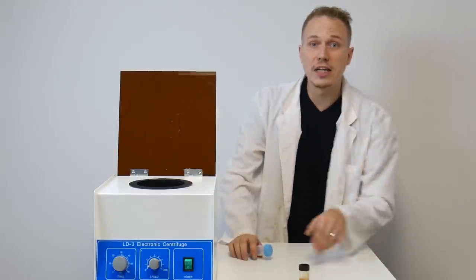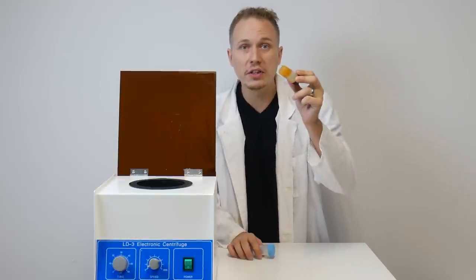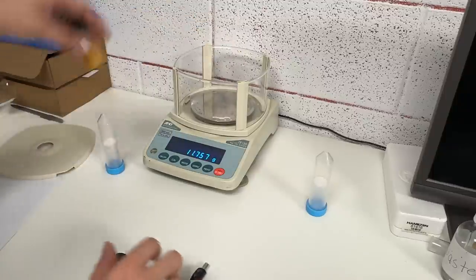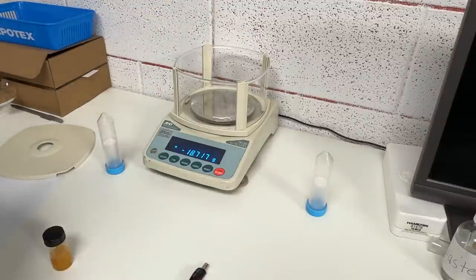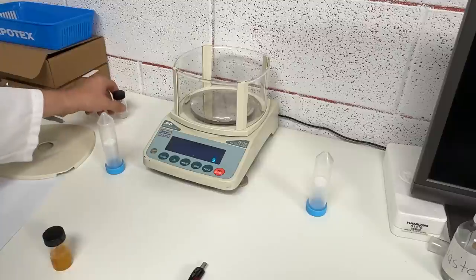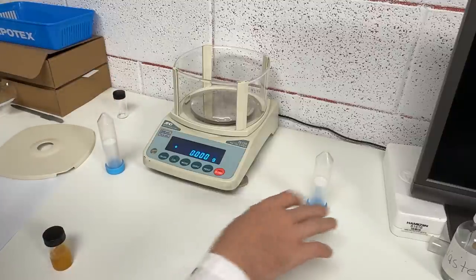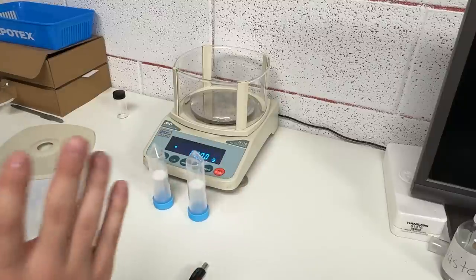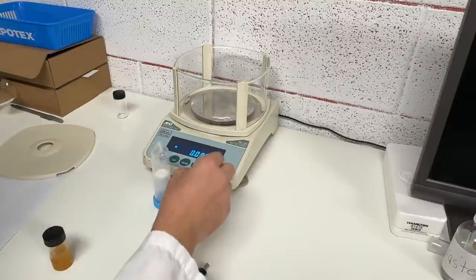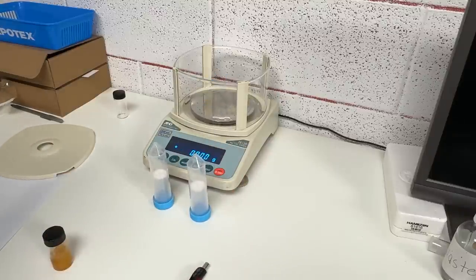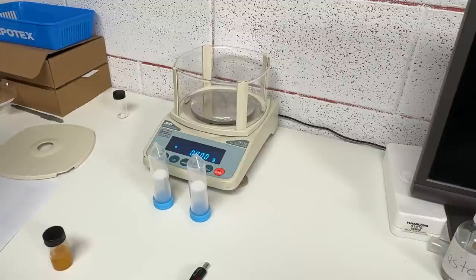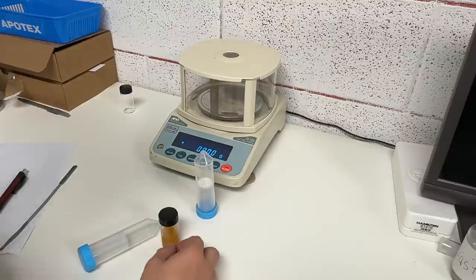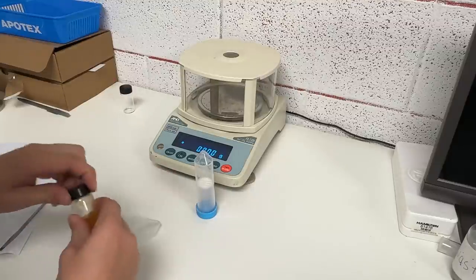Alright so let's get started. The first step is I gotta scoop out my live resin here and put it into these containers. I'll try and put five grams in each. I have approximately 11 grams of live resin. I am leaving the tops on both of these so that when I fill them up I can make them the same weight including the lids as there is some variance in the plastic. So I'm going to try and bring them both up to the same total weight including the lids. So I'll try and put 22.3 grams in each test tube.